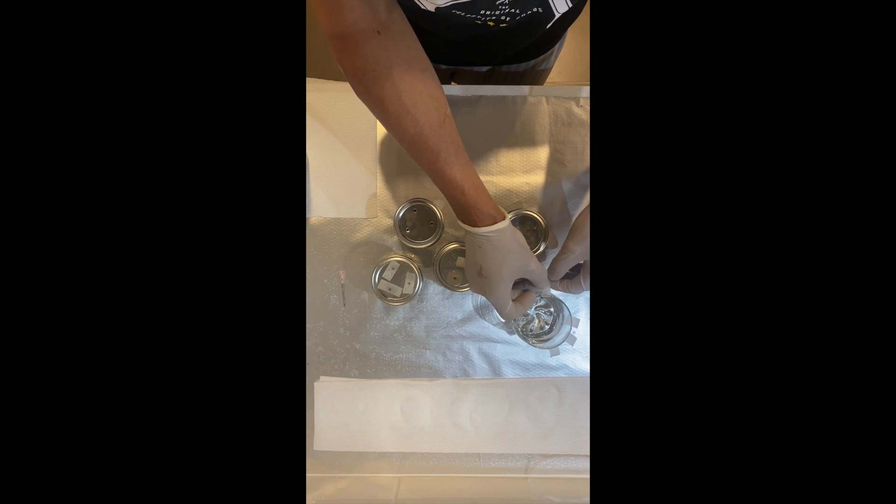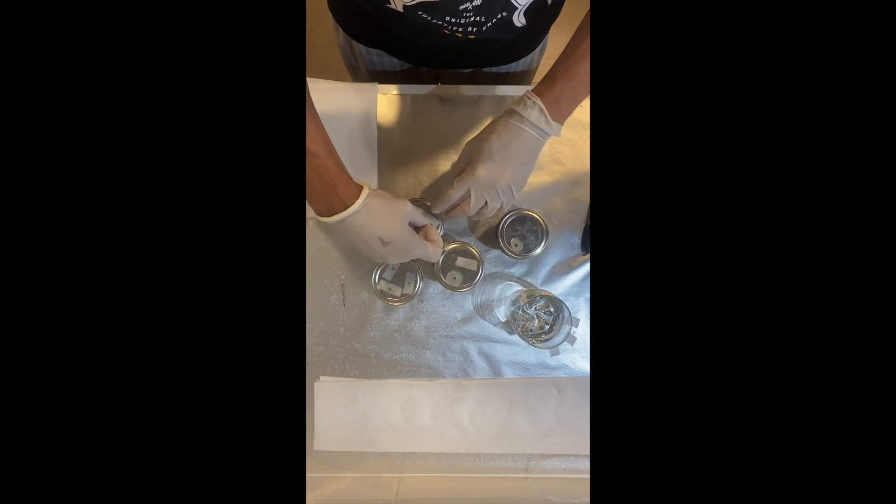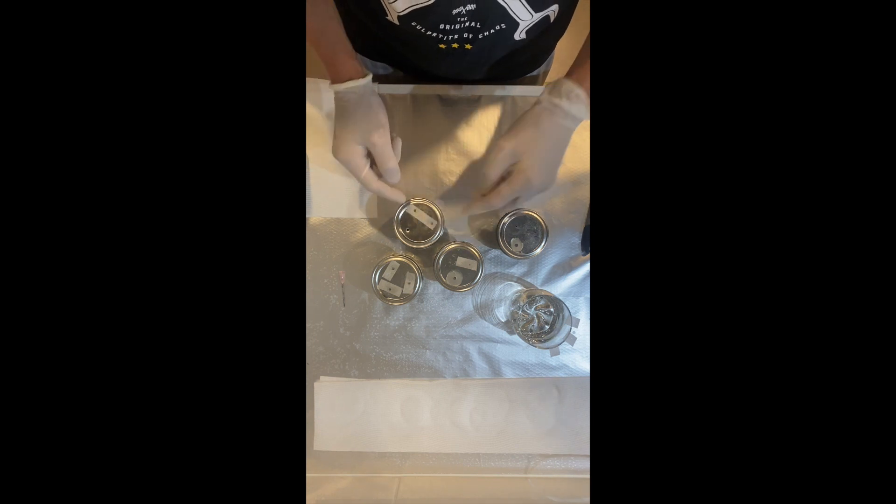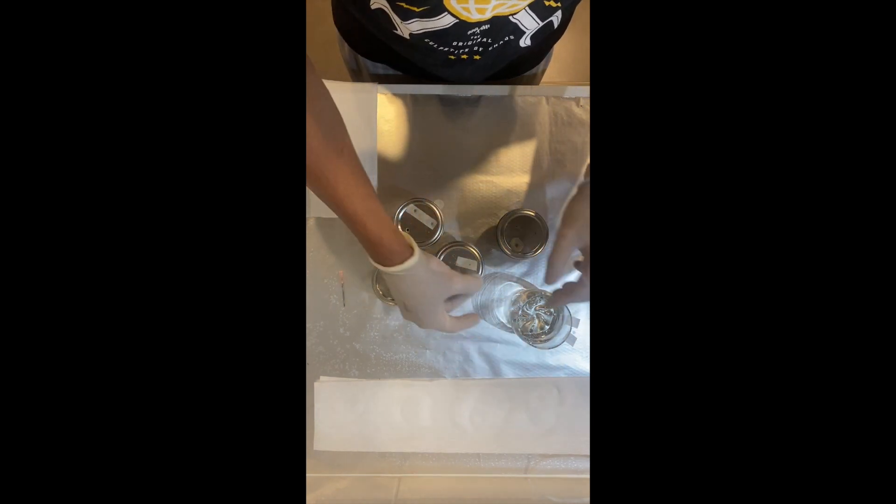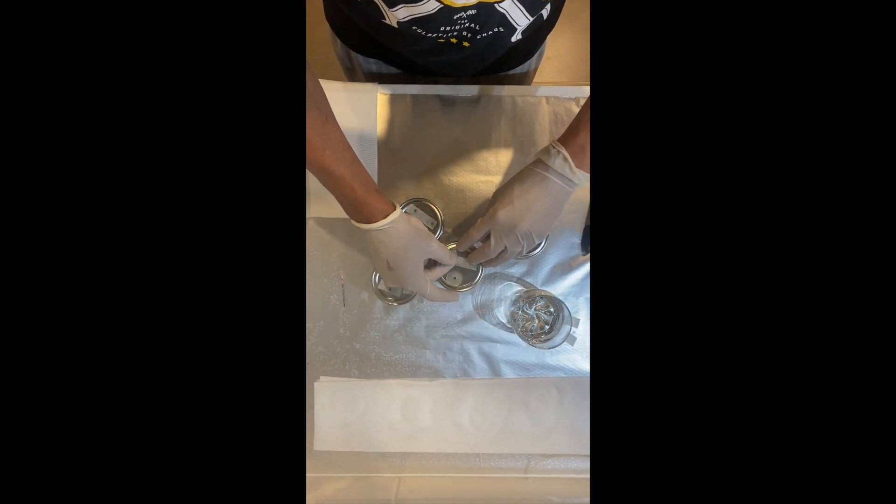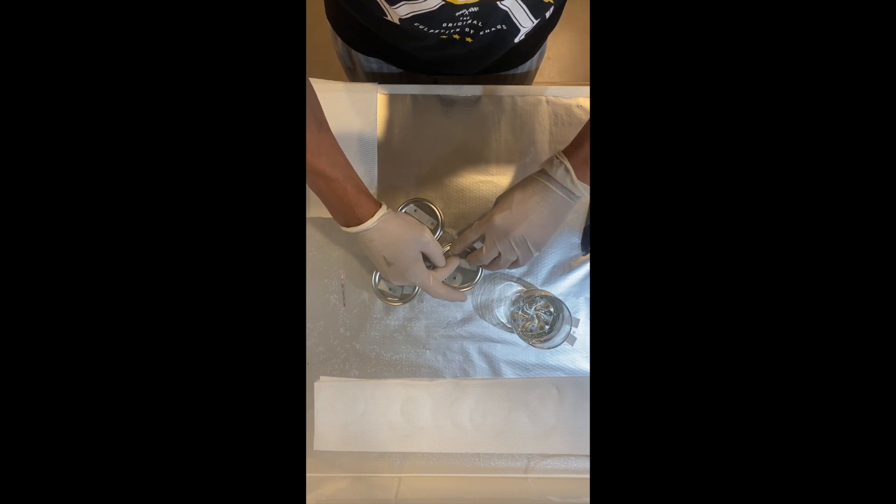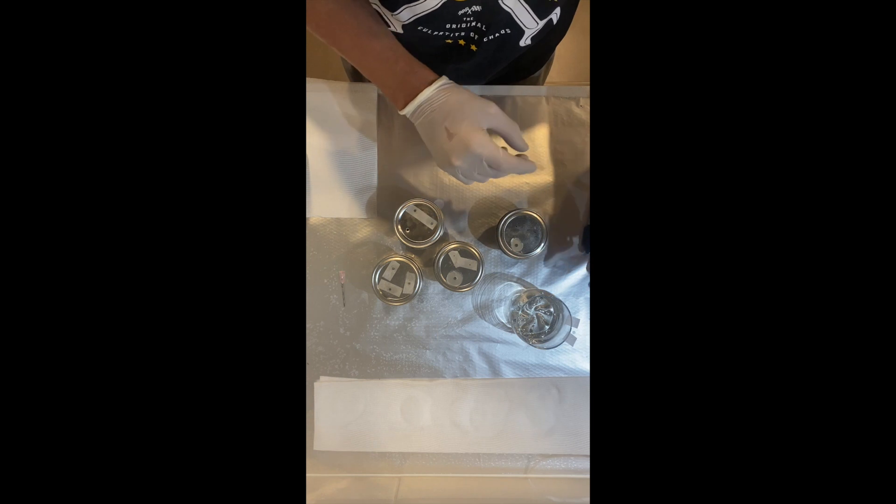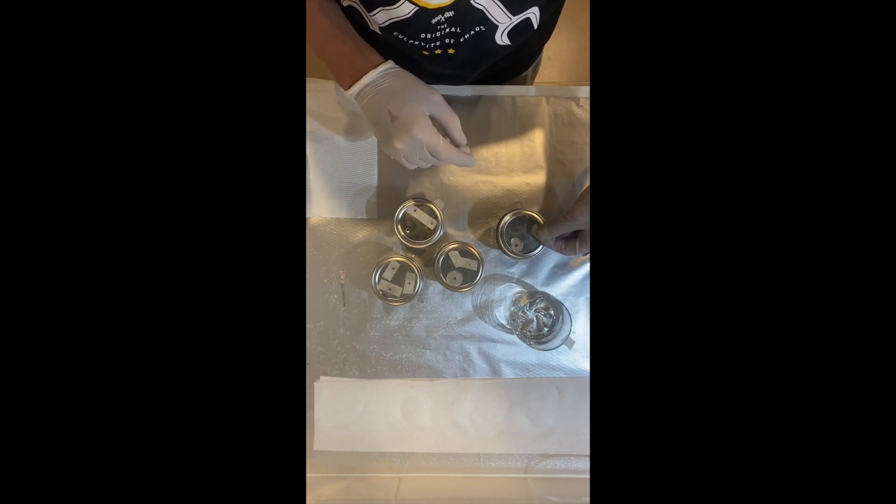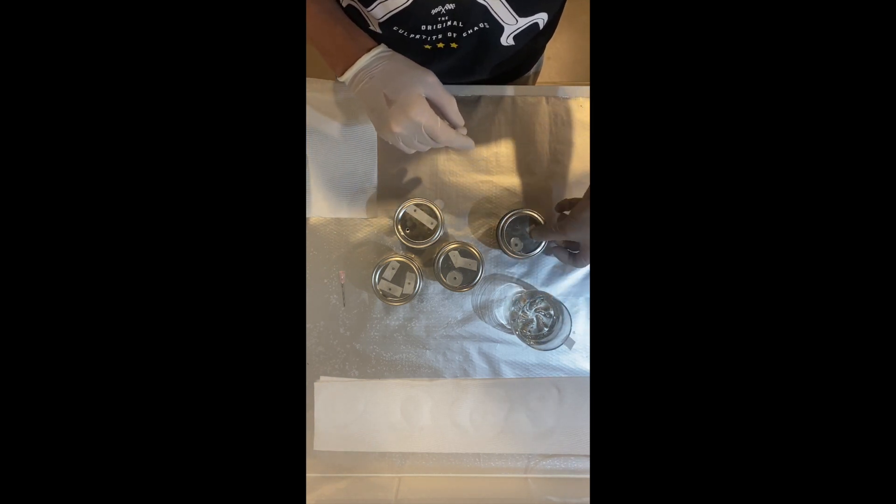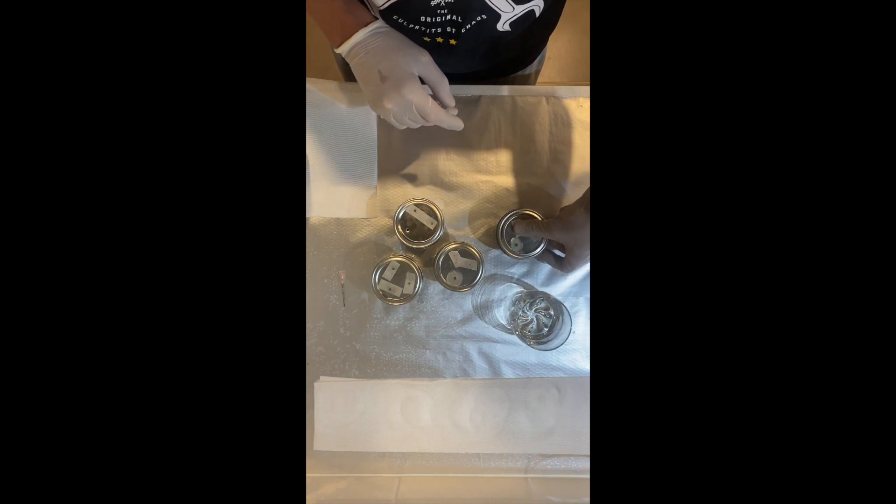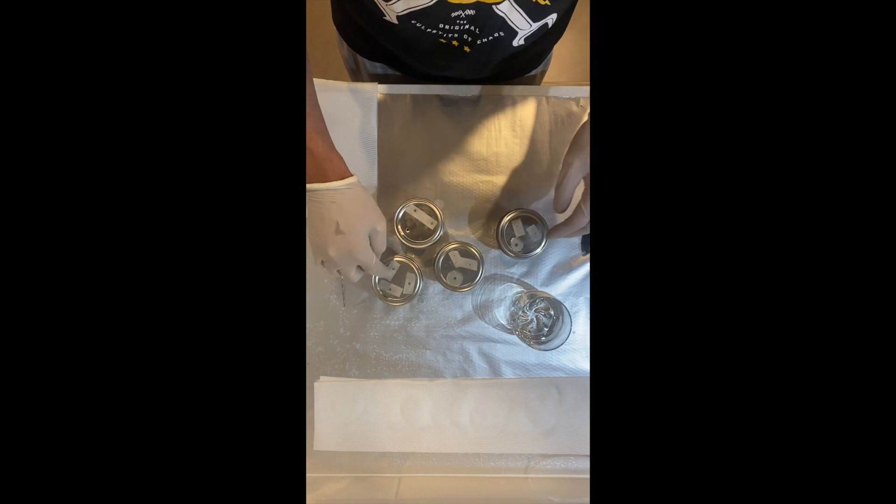Once that's done, we are going to use the tape that's there, if it's big enough, or you can put another piece of tape if you really need to. And we're just going to write the date. Just gives you an idea, once you have a few different sets of jars going guys, when they were inoculated, how long you should be waiting, if there might be a problem with them, etc. So I do always like to date my jars.